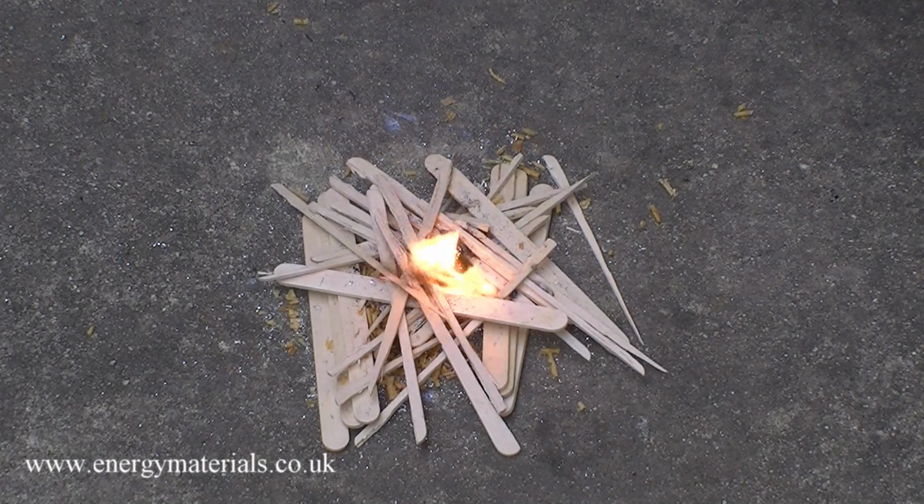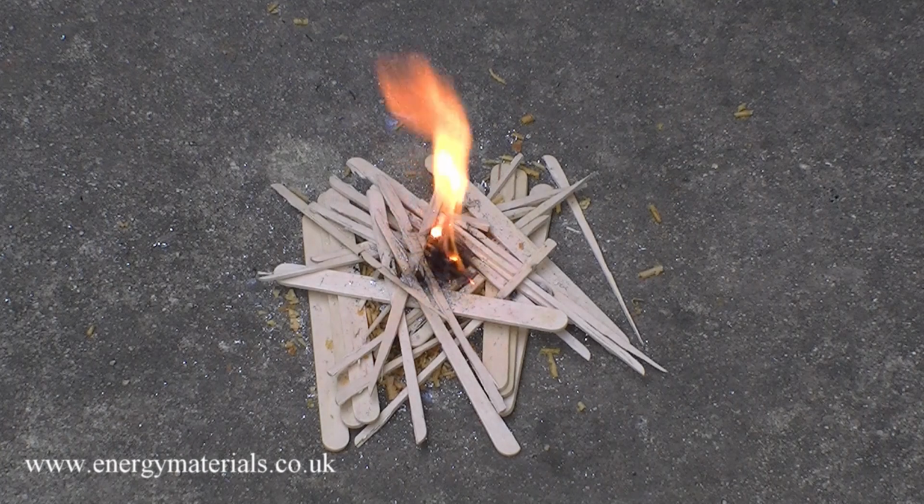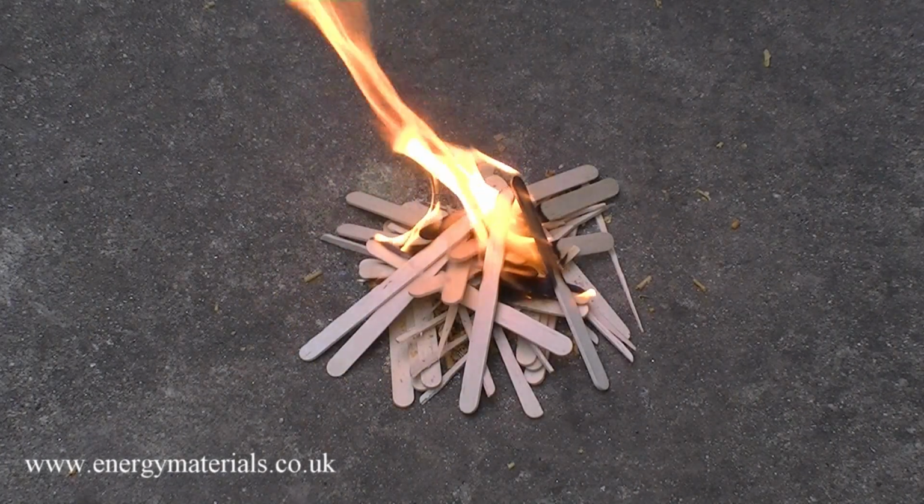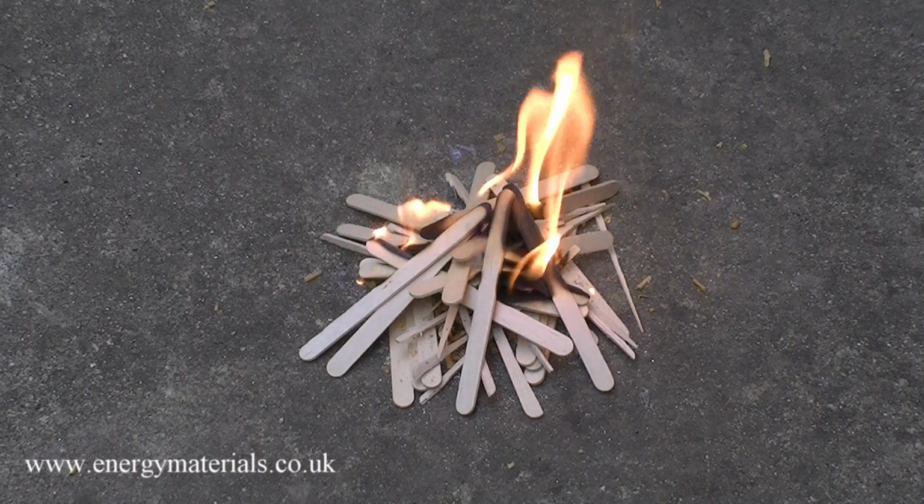Sparks are sent towards the powdered magnesium, which reacts, generating magnesium oxide, magnesium nitride, and a significant amount of heat, which is what's igniting the surrounding material.